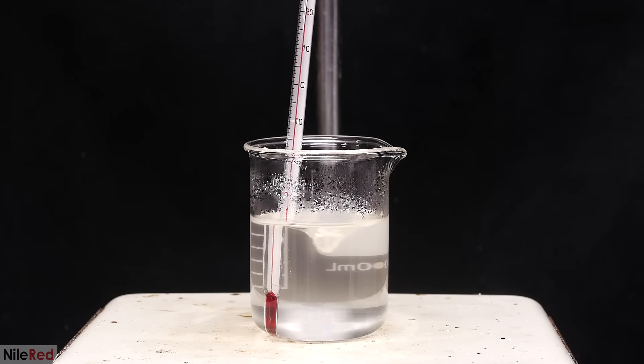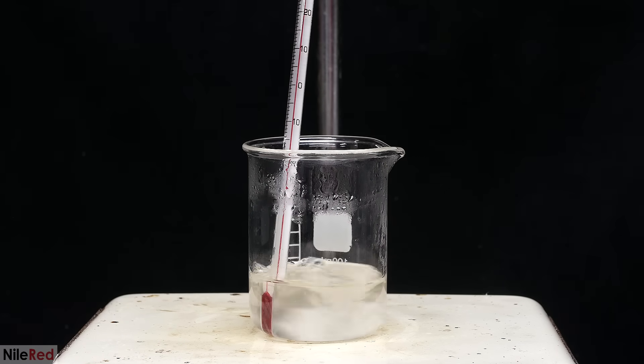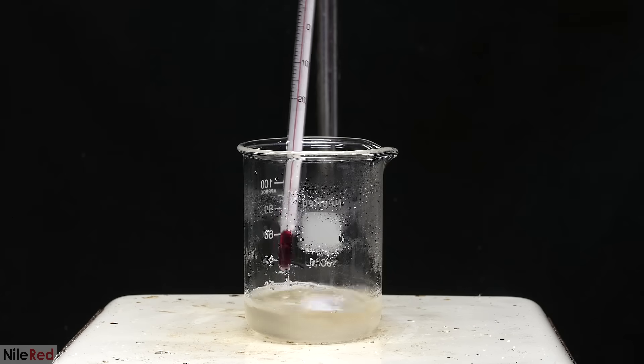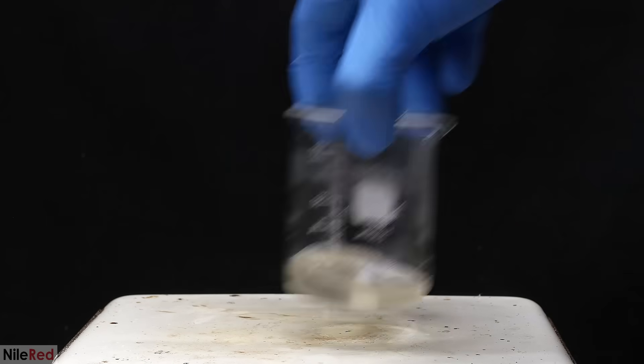When it got to a volume of about 80 milliliters, I transferred it to a smaller beaker and then continued to boil things off. I reached the 90°C mark when the volume was around 20 milliliters, and I took it off the hot plate.